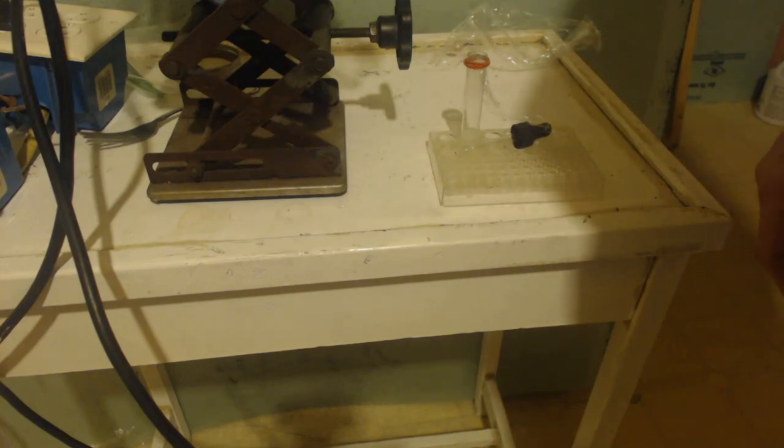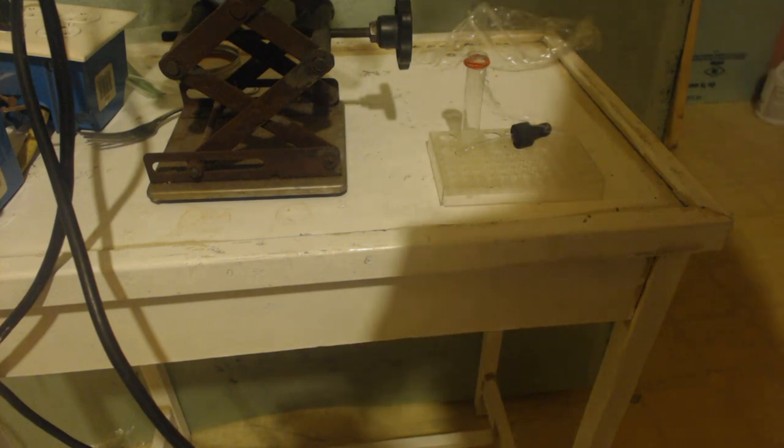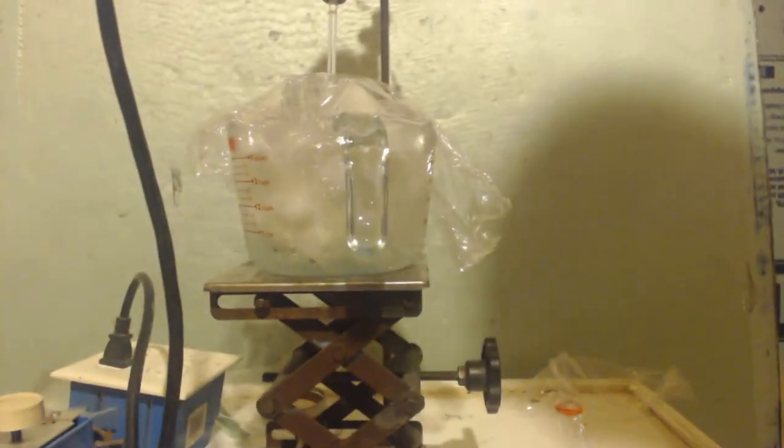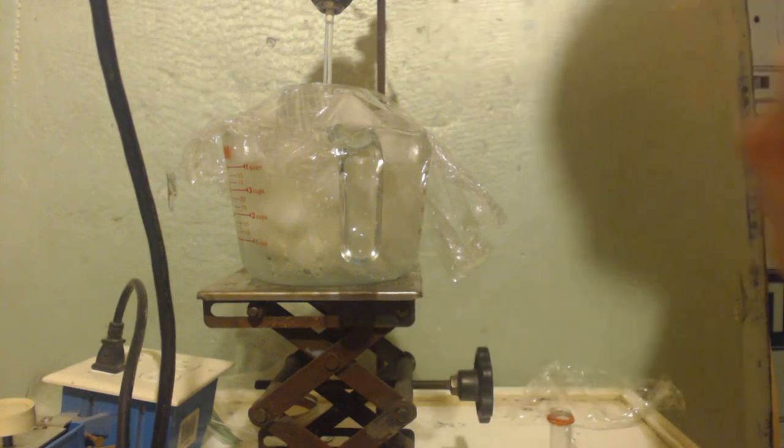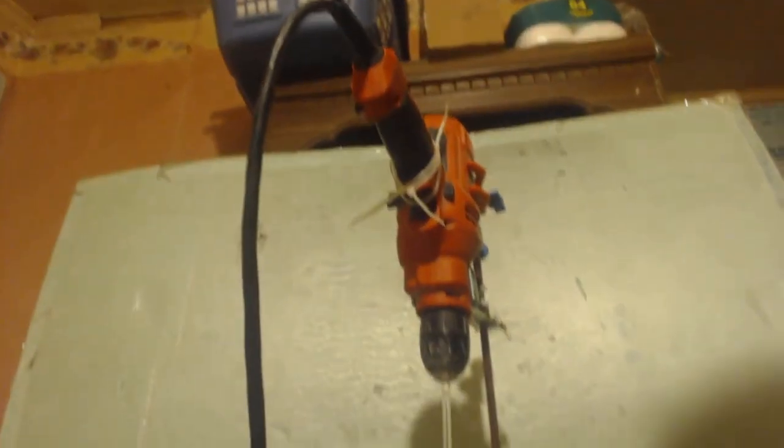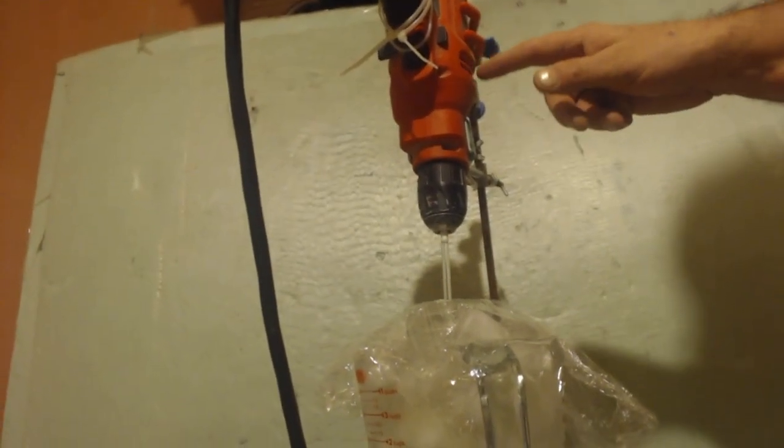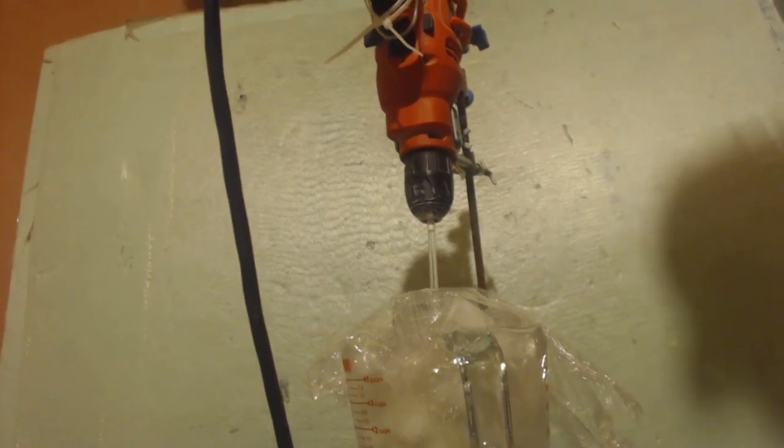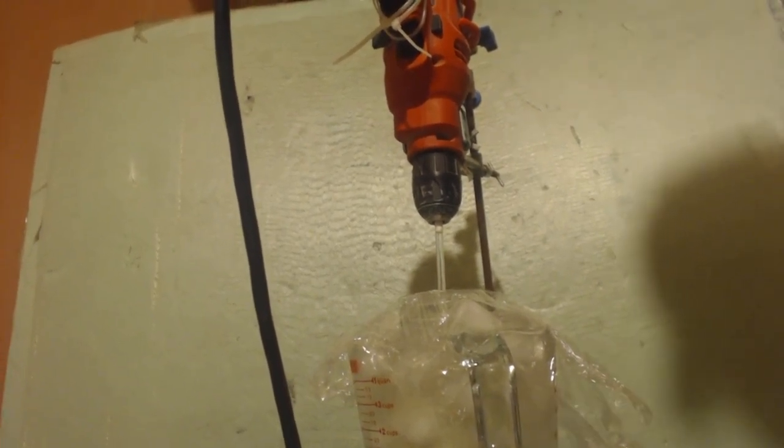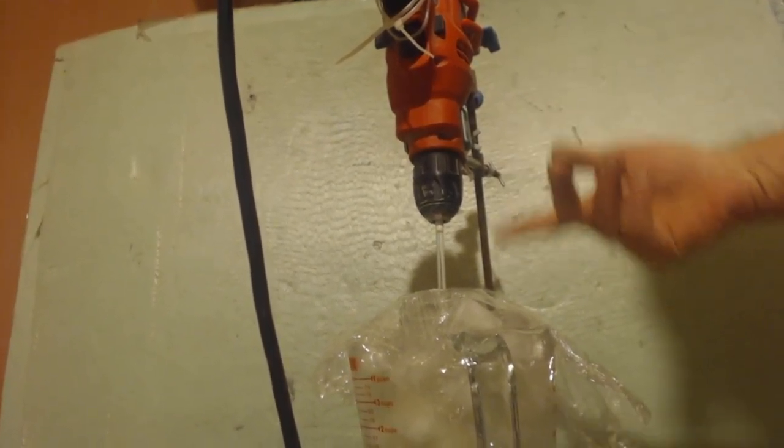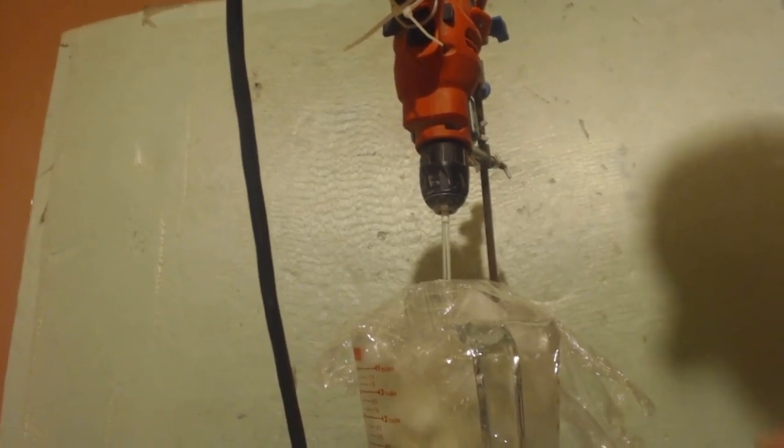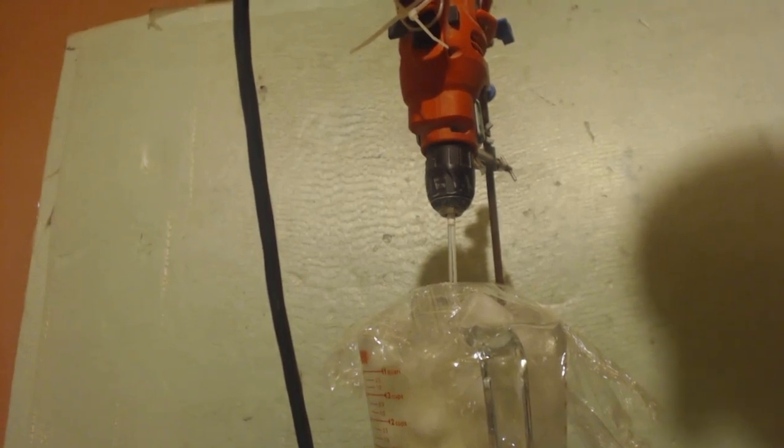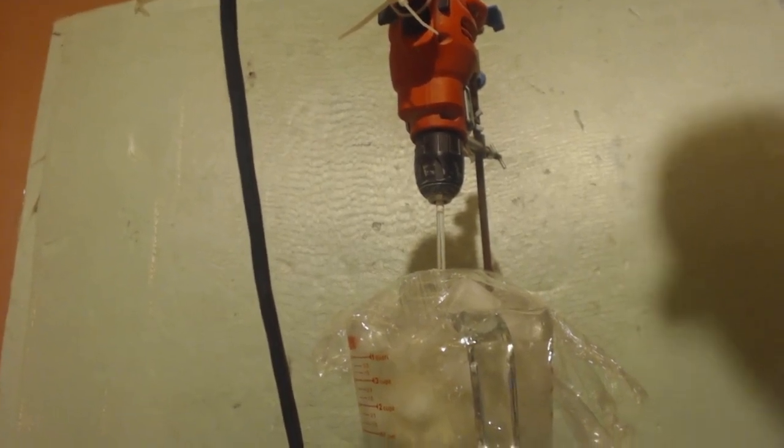So I'm going to keep stirring it. I'm going to stir this thing for three days tops, because that's the instructions. And we'll see. I'm tired of this not knowing. I've gone this far. And remember, do not use this drill like this. This is not the way you do stuff. Like I said, you need the brushless motor so that you can not have any sparks. This is very unsafe. This diethyl ether is evaporating here. It's coming up to the thing. It's like maybe 10 degrees in this room though. It's not like I'm in a heated room. This room is like five degrees, 10 degrees.